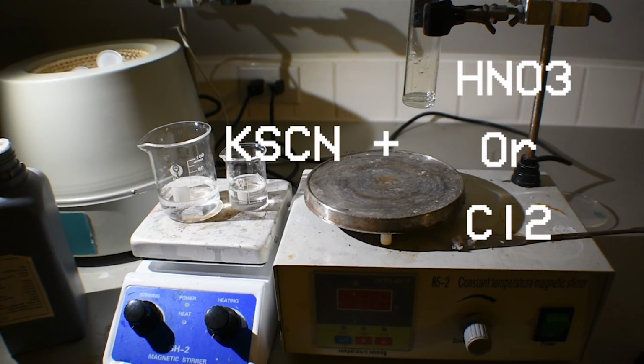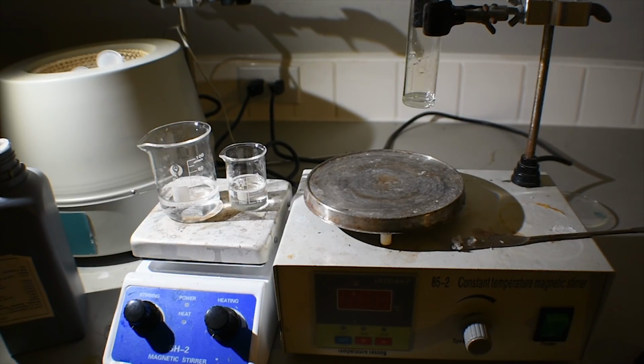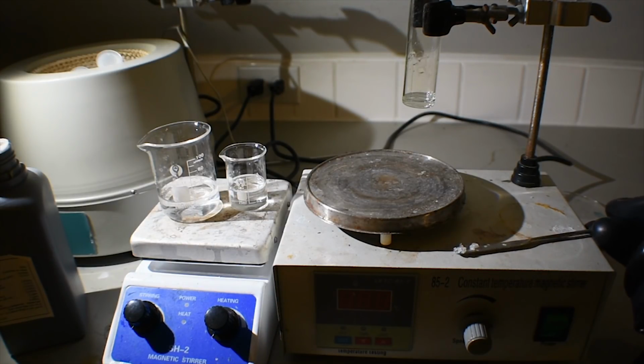It's also possible to form it by the reaction of a potassium thiocyanate solution with nitrogen dioxide, but I haven't tested this fully quite yet. As you might know, or might not know, thiocyanates in the solid form react violently with nitric acid. If you haven't seen this before, let me give you a little taste of that here.